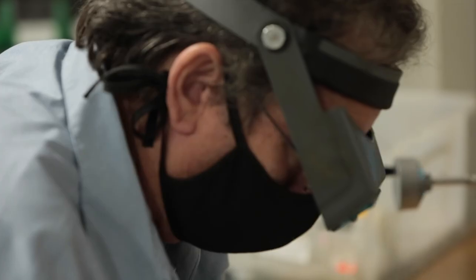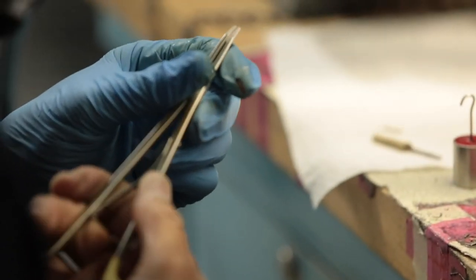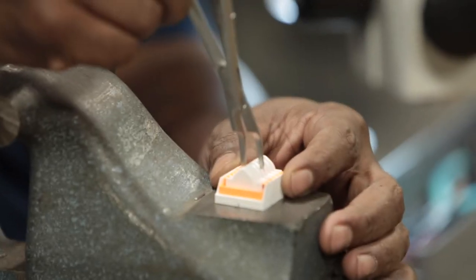As part of our warranty, we provide free repairs and restore the applier to like new condition. We manufacture our appliers and provide the only repair service that can return them to true manufacturer specifications.